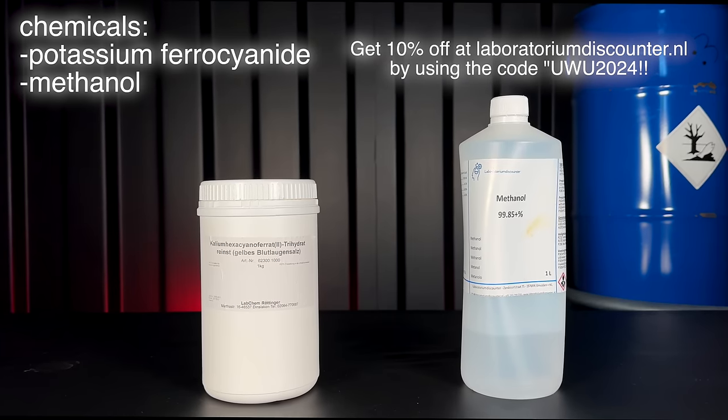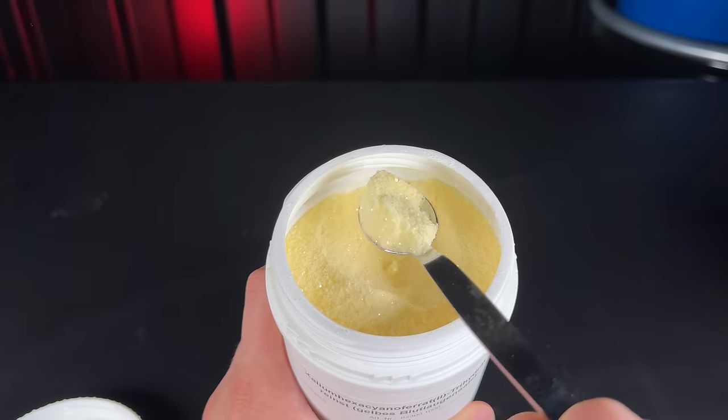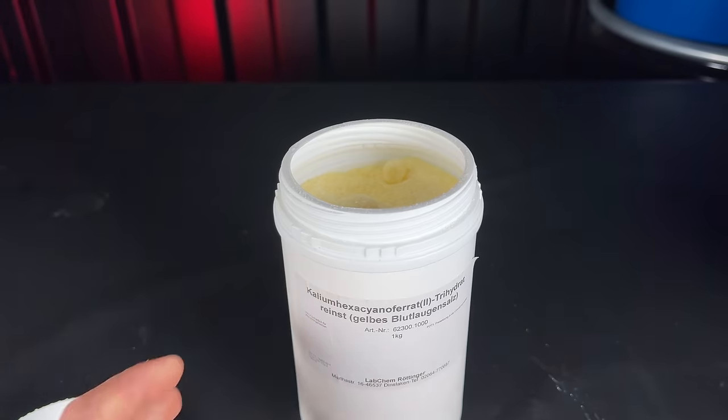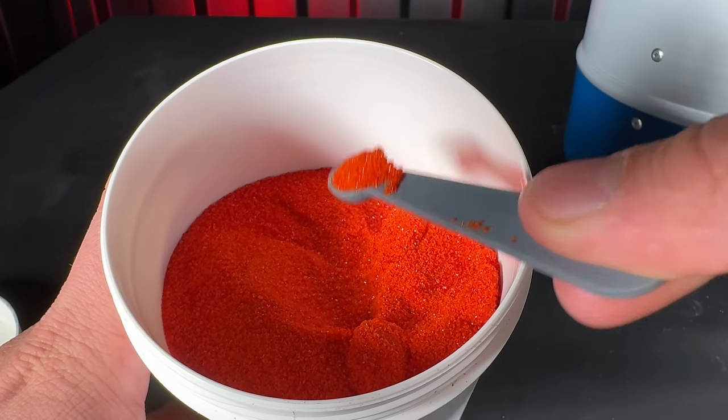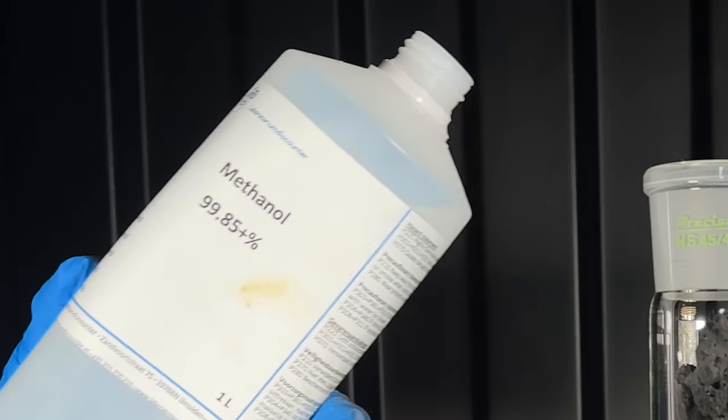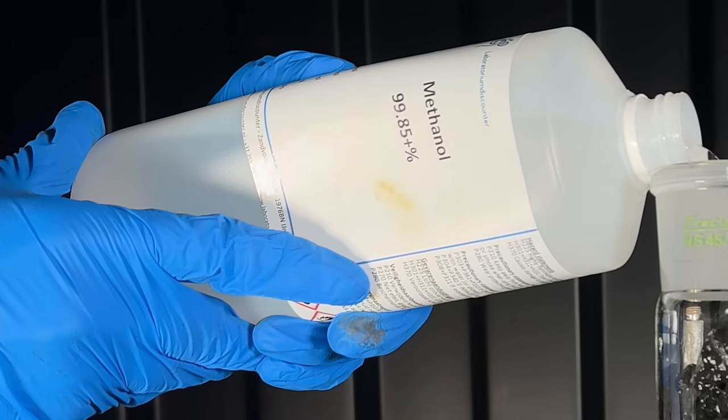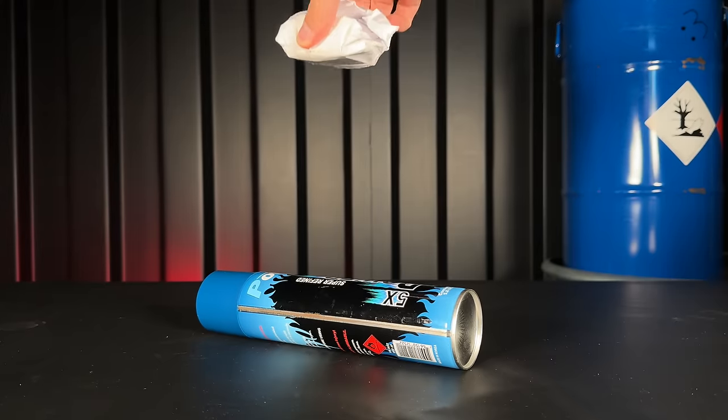What's great about this method is that I only need two chemicals, both easily available and cheap. The first chemical is potassium ferrocyanide, which is this yellow salt. There's also potassium ferricyanide, which is red, but I'm not going to use that. The second chemical is methanol, which is necessary for purification.